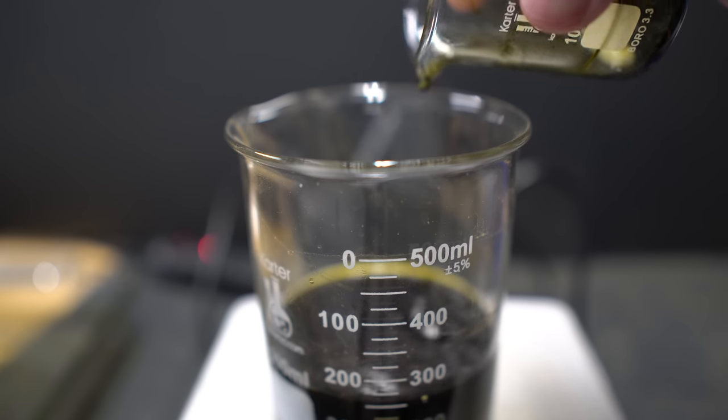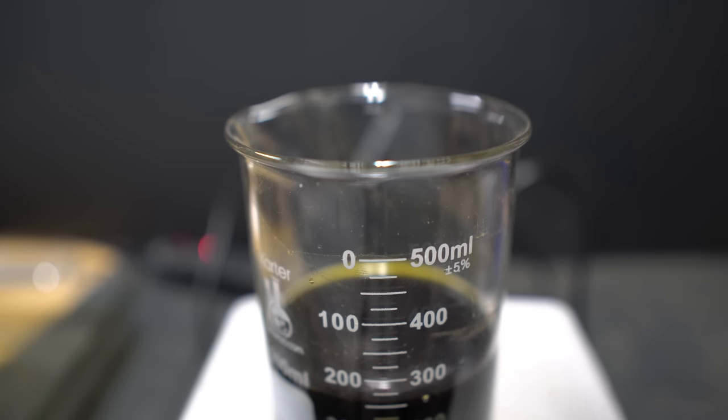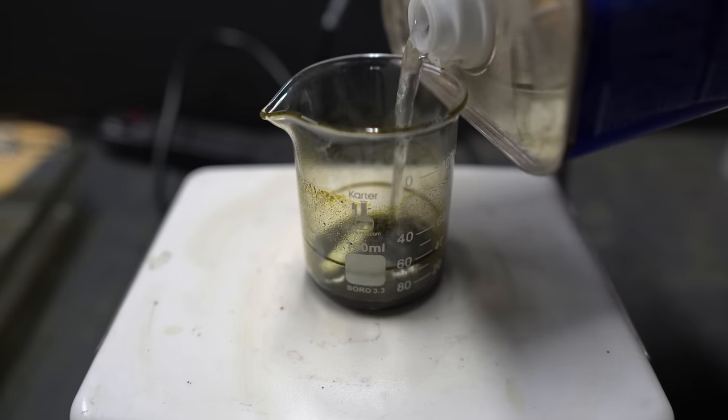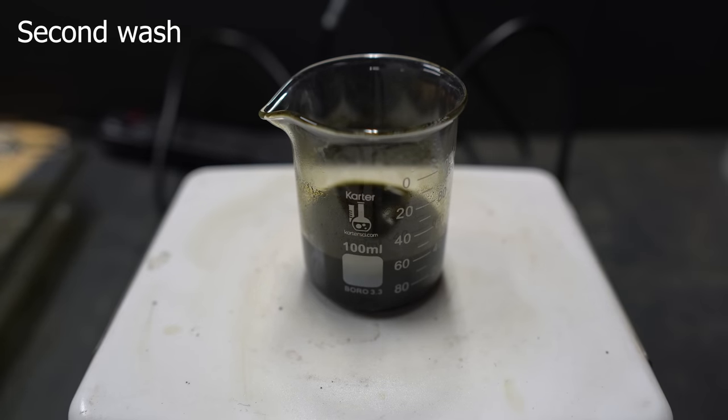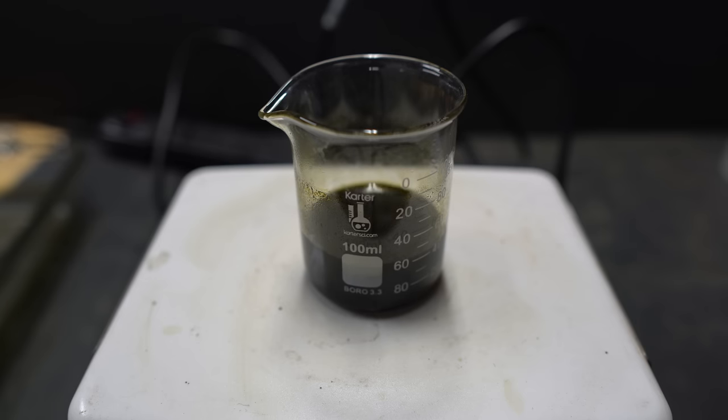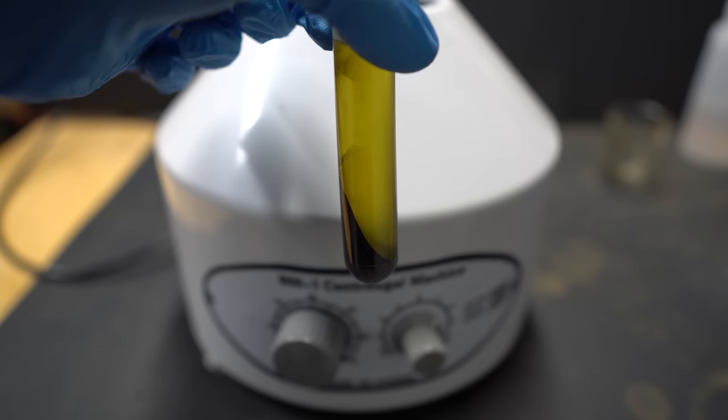You can do it this way, however I'm pretty lazy and I really want an efficient way so I use the centrifuge. The major benefit of the centrifuge is that the particles don't swirl around when you pour out the solvent, so that's why I decided to use it.